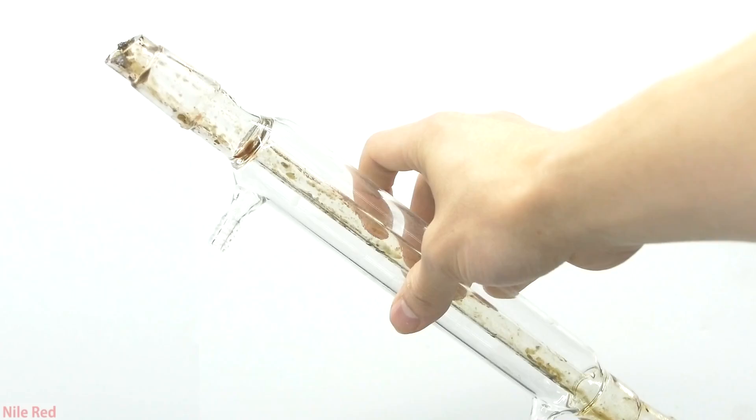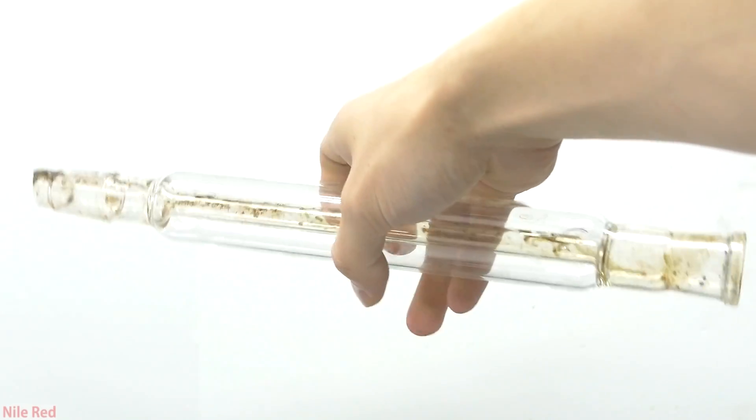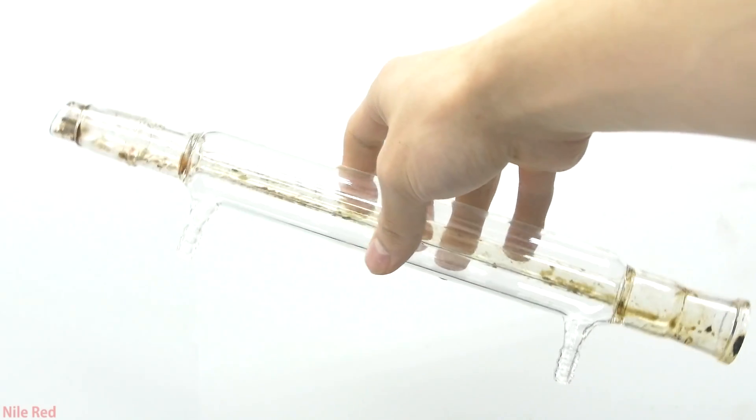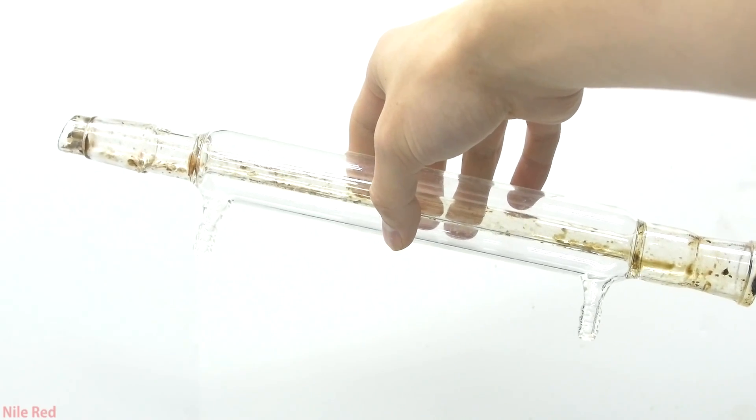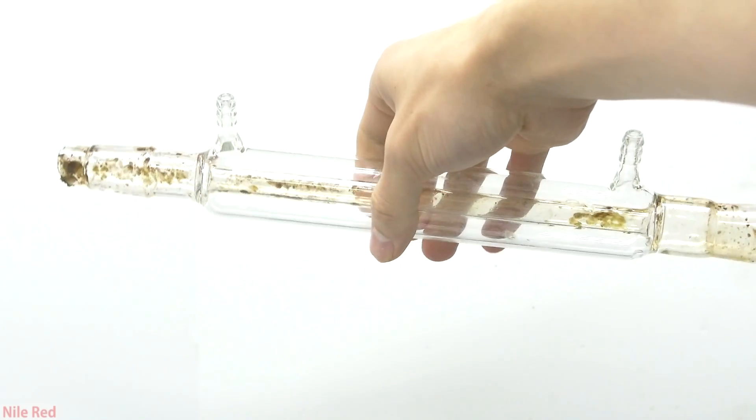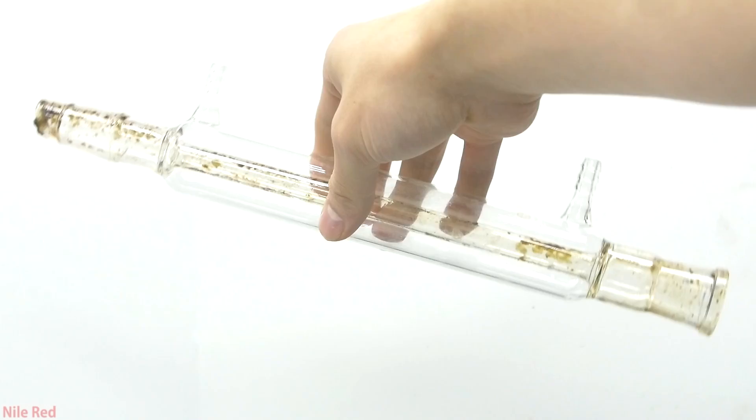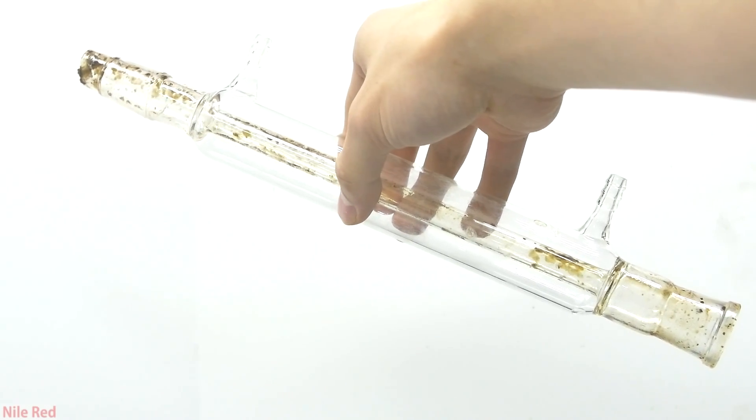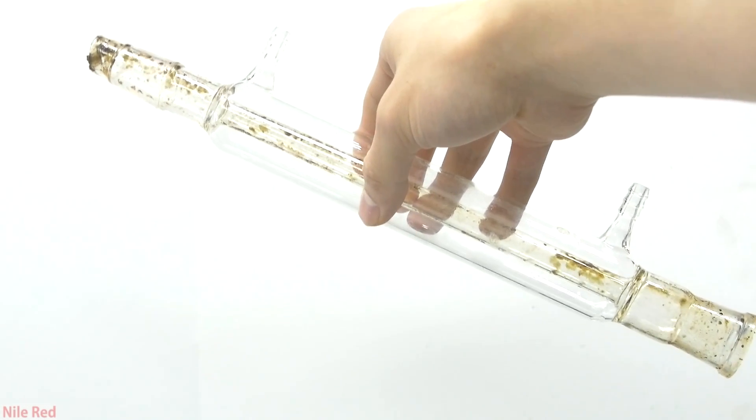For pretty much all of the glassware, I threw it into a base bath to destroy any of the acrolein that might remain. After sitting in the base bath for a little while, I took it out, and I had to manually scrape off all of the acrolein polymer. It doesn't really stick too well to glass though, so it wasn't very hard to do.